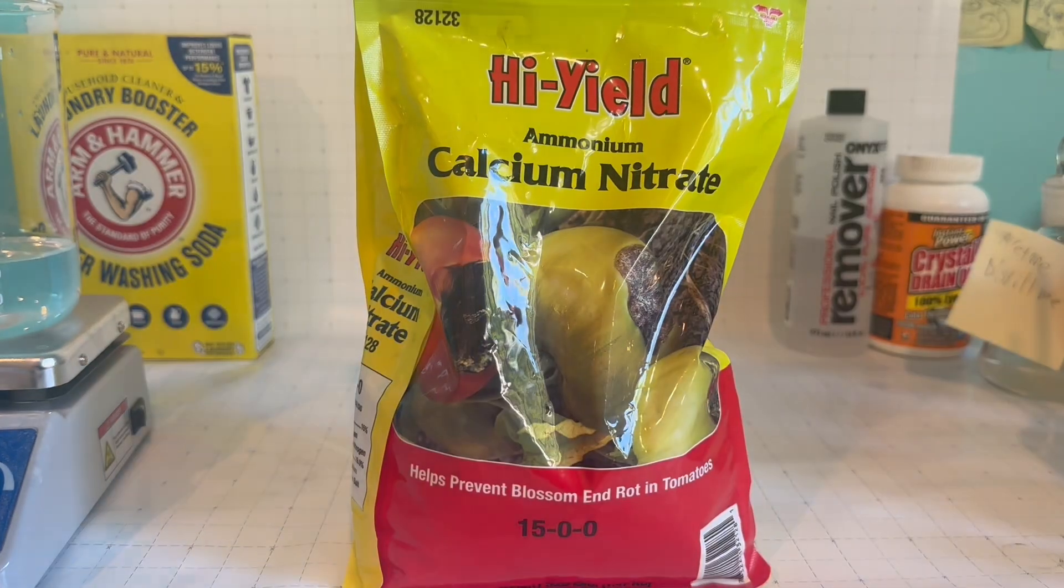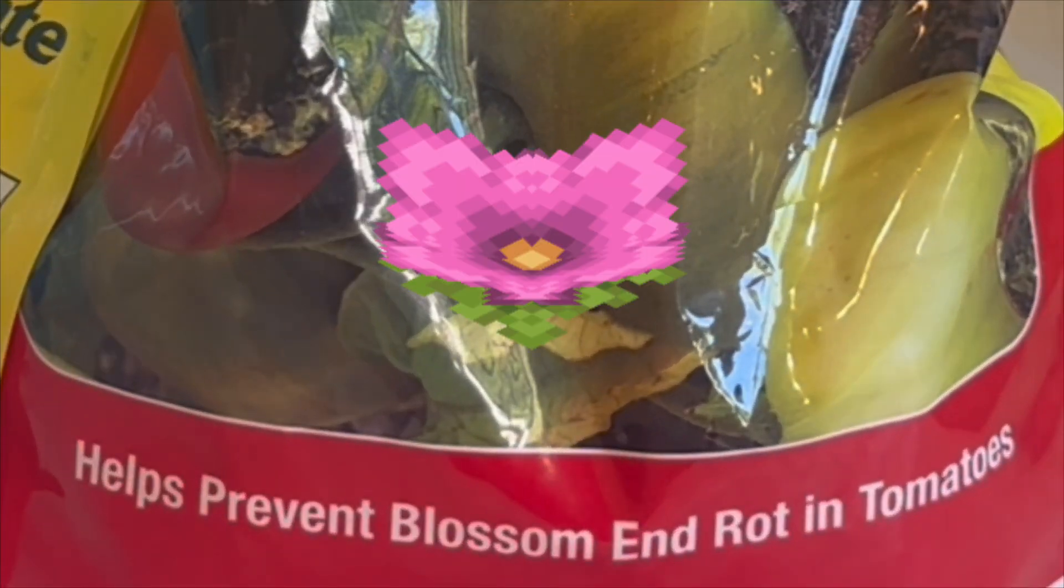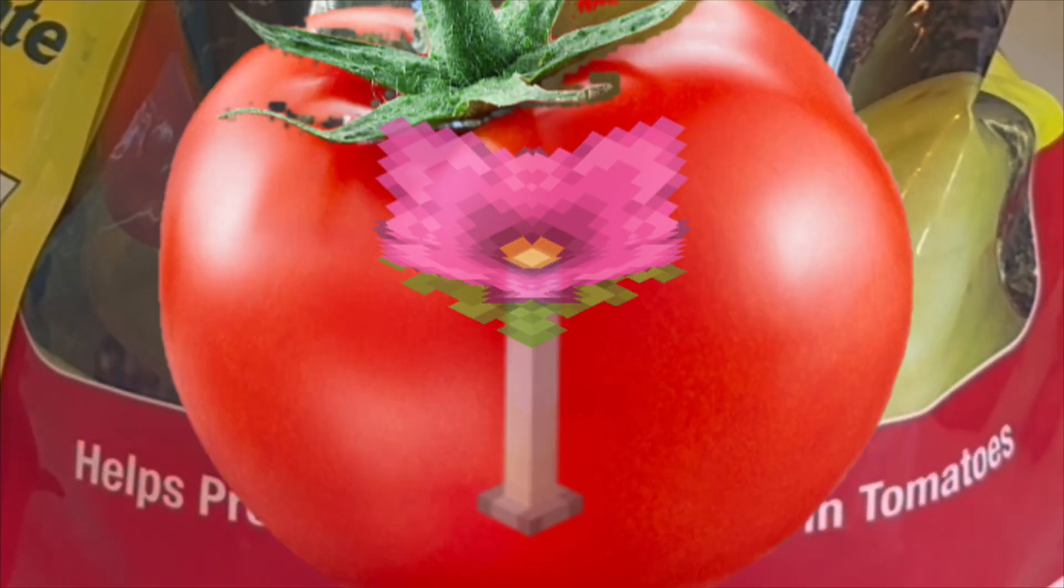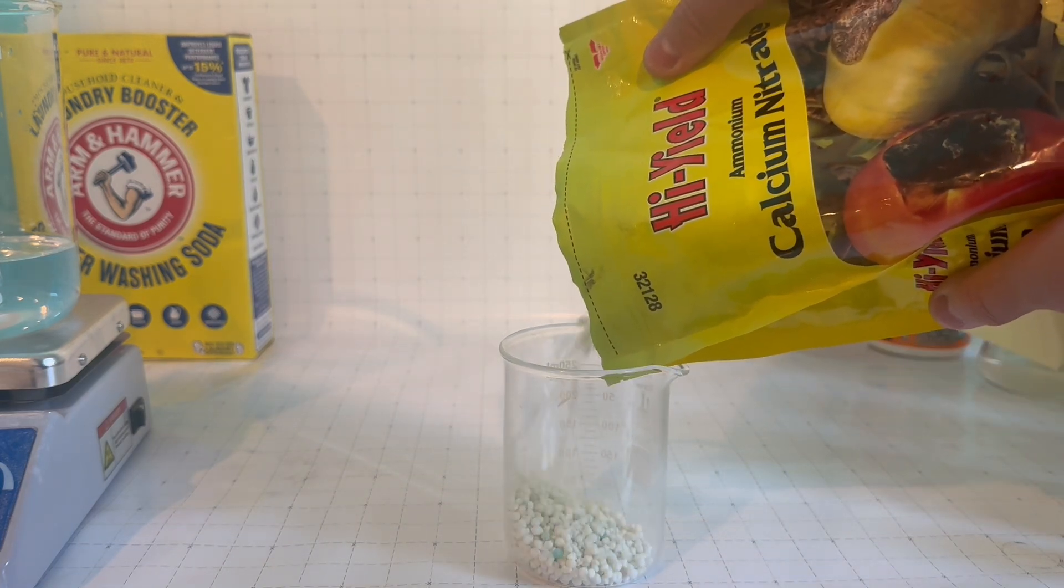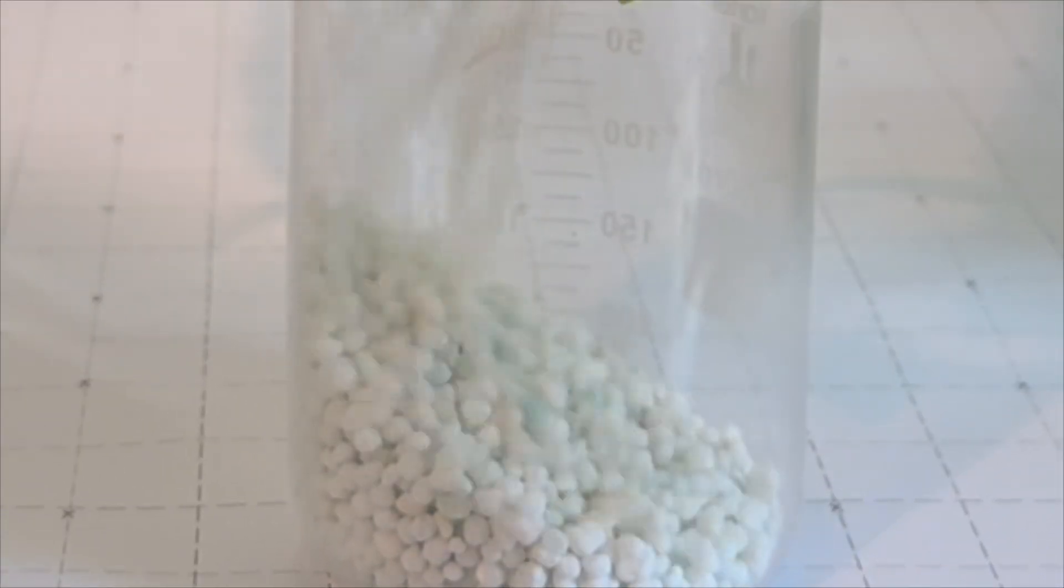For my fertilizer, I used this brand that apparently prevented blossoming end rots in tomatoes. However, the first problem arises when I pour out the fertilizer, as it contains many weird blue bits that are clearly impurities.